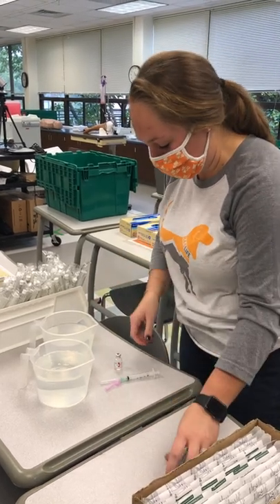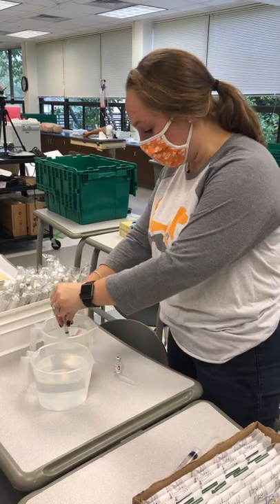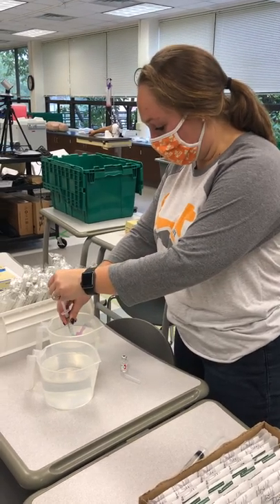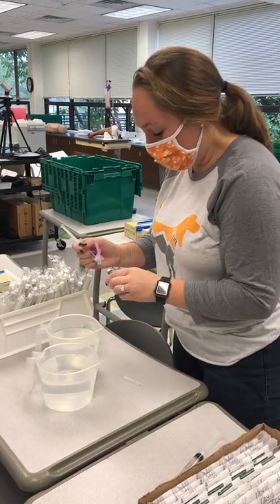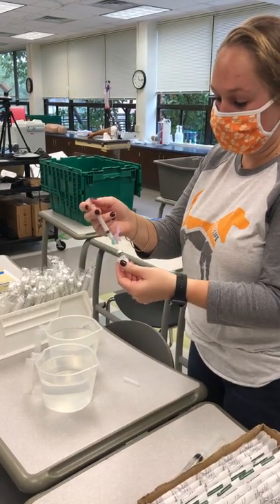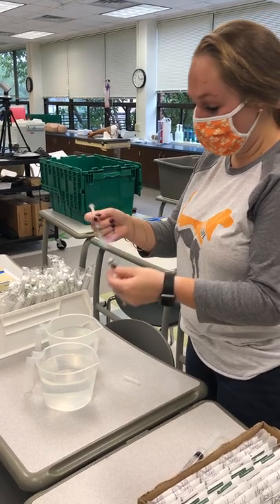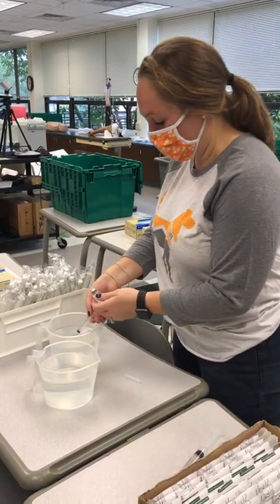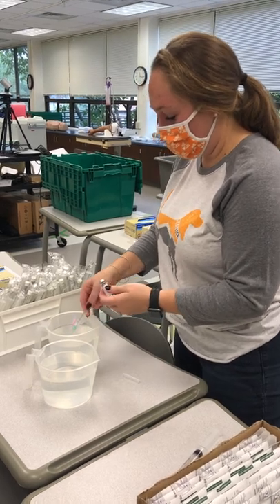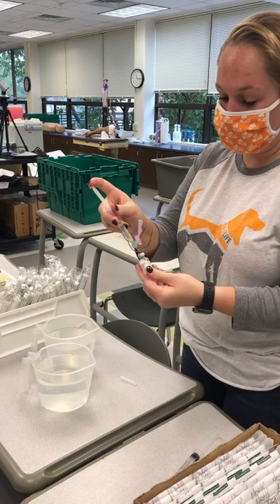Put your cap back on — that's all you need. Then for the vial, just take a needle, put it in, get what you need, and put it in there so it's refilled. Let the pressure of the air kind of come out; it'll be easier to put the solution in. That's how you refill it without needing new syringes and new vials — that will work for you.